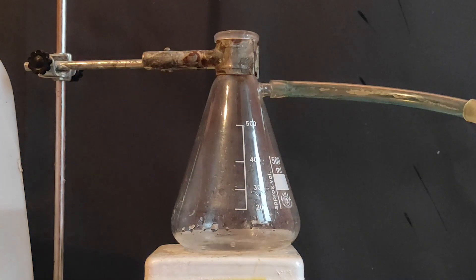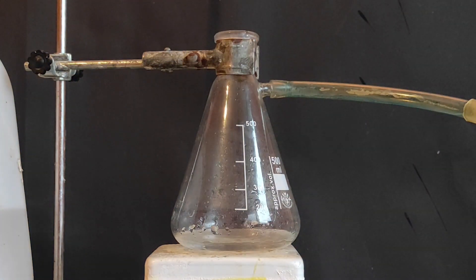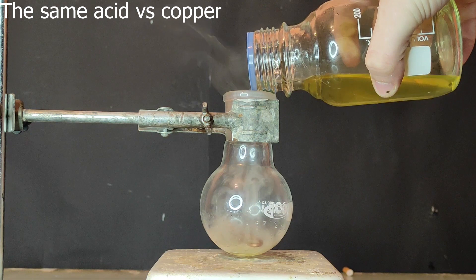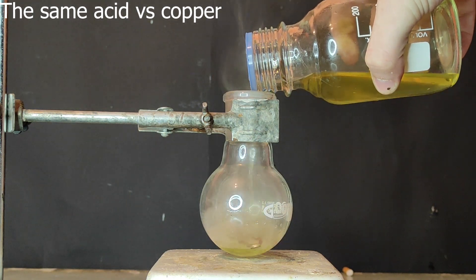So first to the flask I add small amounts of water, and that's to dilute the nitric acid that I'm about to add. The acid that I currently have is 100% nitric acid, which means it doesn't have water in it.